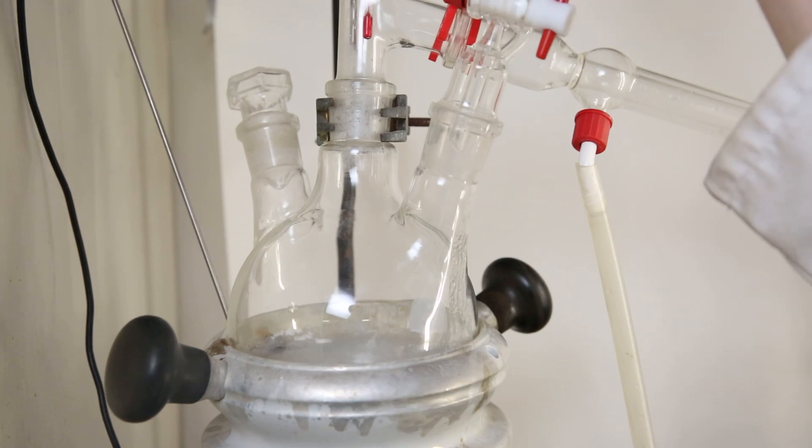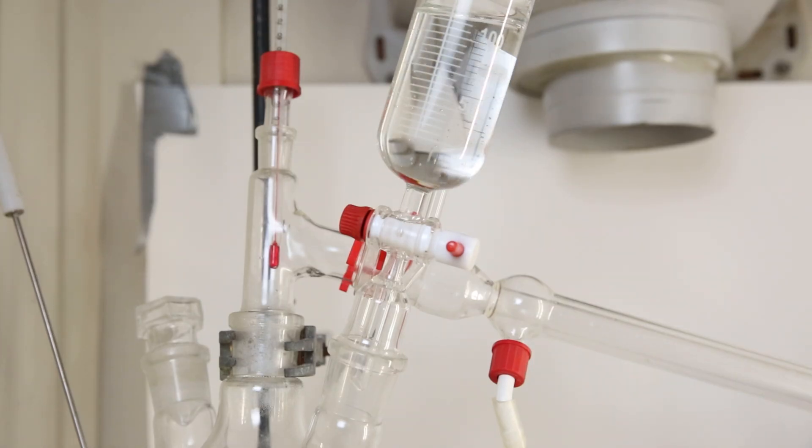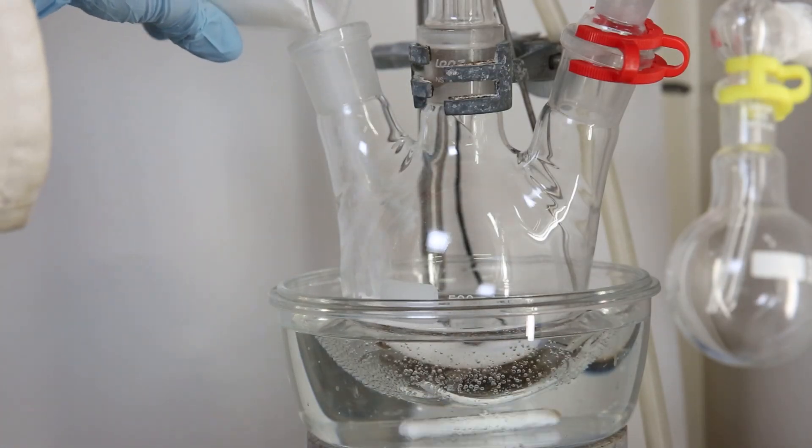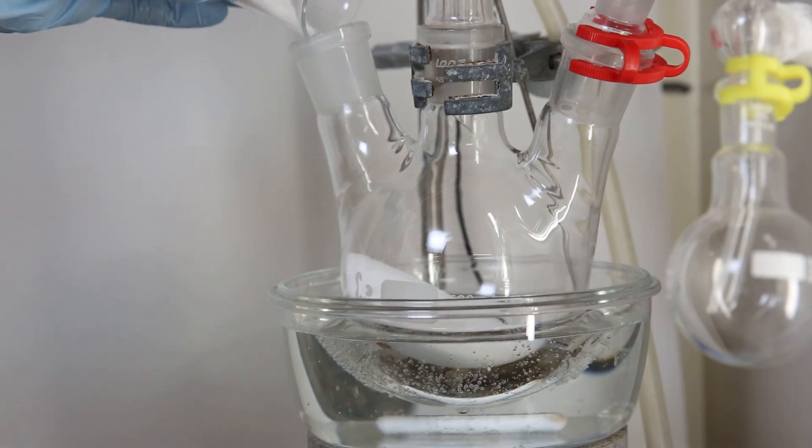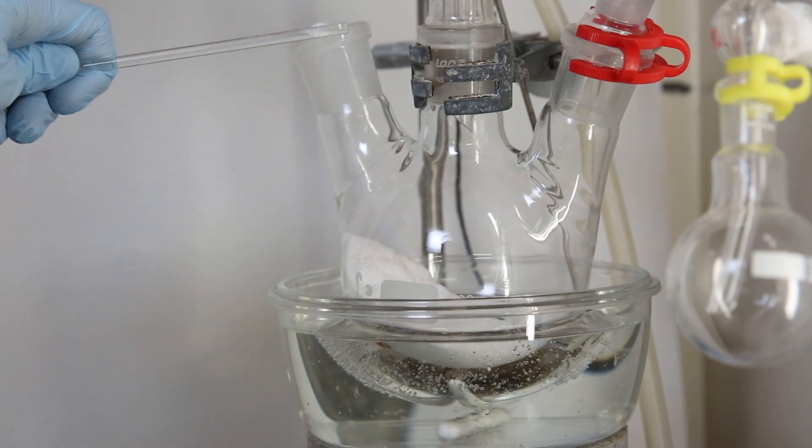Then I attach an addition funnel and fill it with 300g of glycerol. To the first receiving flask, I add 150g of sodium chloride and on top of that I add 5g of hydroquinone, which will hopefully reduce polymerization of the Acrolein.